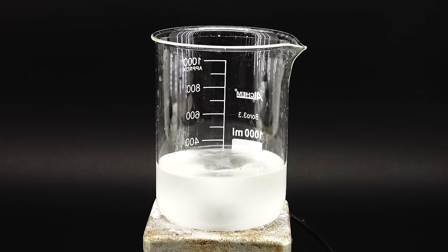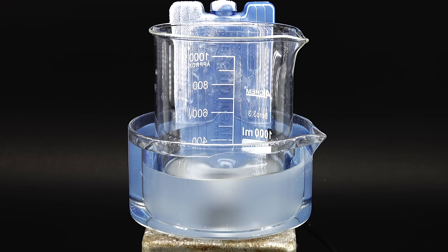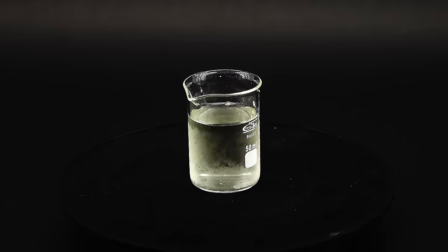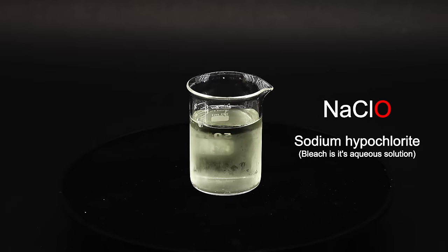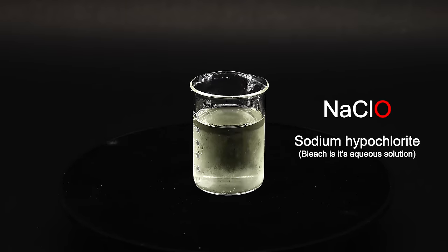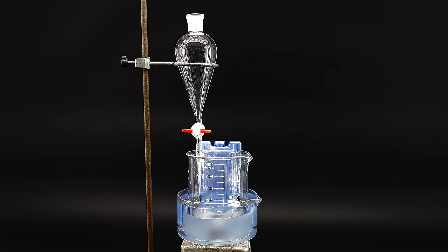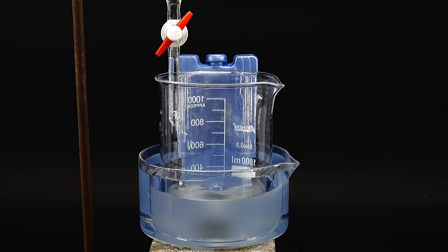Now, before adding in the bleach, I got the whole beaker into a cold water bath, which should hopefully improve my yield. When everything cooled down, I was now ready to begin the reaction. I measured out 125g of 15% bleach, or more chemically speaking, an aqueous solution of sodium hypochlorite, which structurally closely resembles table salt but has this additional oxygen atom that makes it extra angry and powerful enough to react with ammonia. To add my bleach into the reaction beaker, I can't just pour it in all at once because that would cause a lot of nasty side reactions to happen. So to add it slowly and not lose my sanity along the way, I set up this neat separatory funnel above the reaction beaker and poured all the bleach into it.